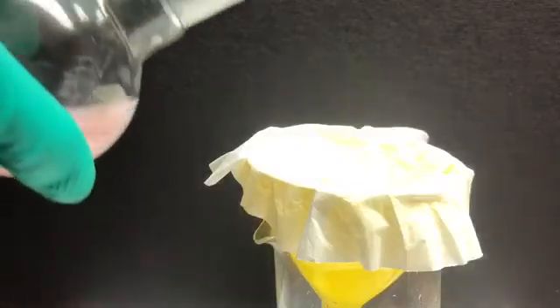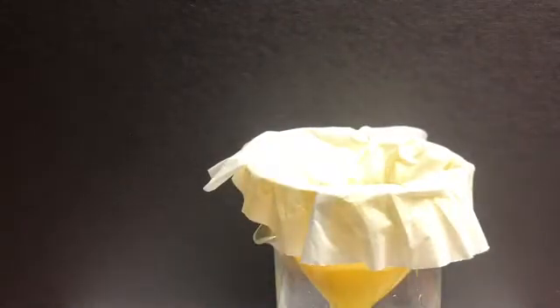You can see this white precipitate at the bottom — this is our aminoguanidine bicarbonate. It's fairly crude at the moment, but we can later recrystallize. But first we have to filter it. Here it is — here's our aminoguanidine bicarbonate.